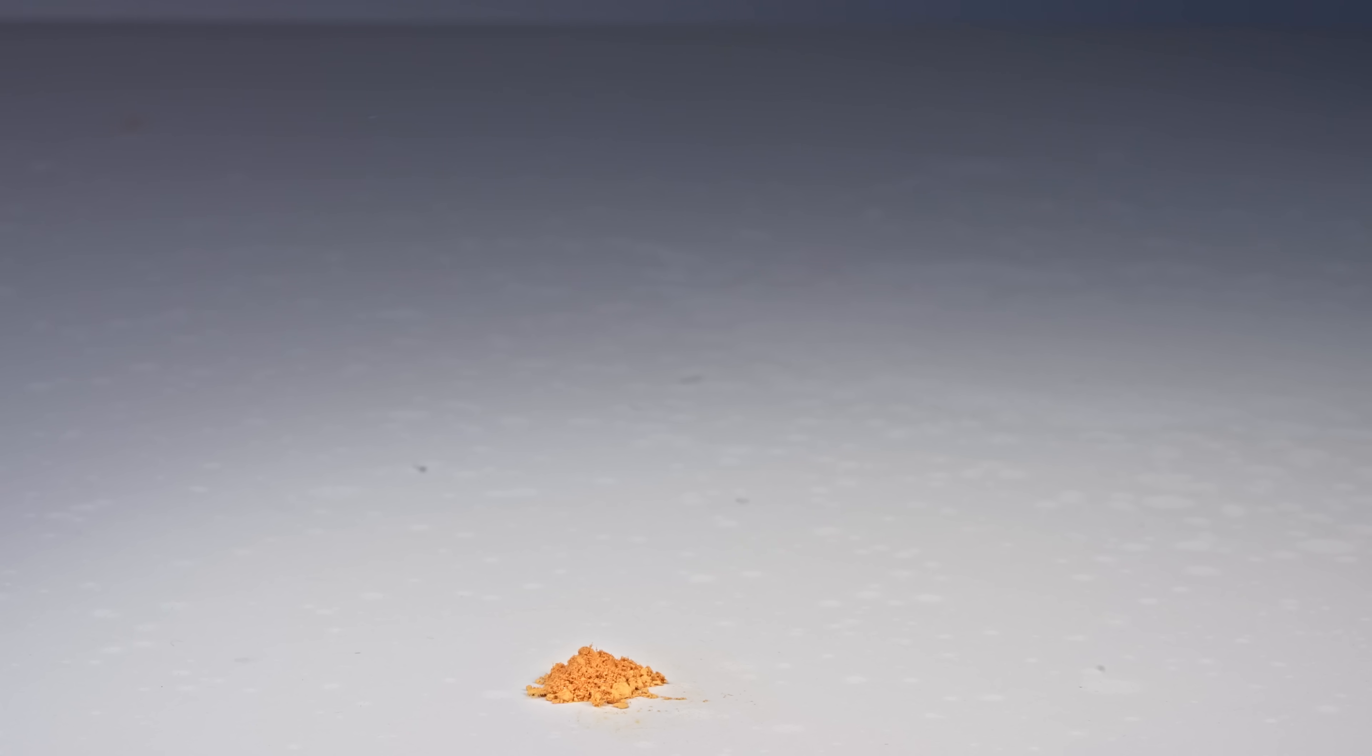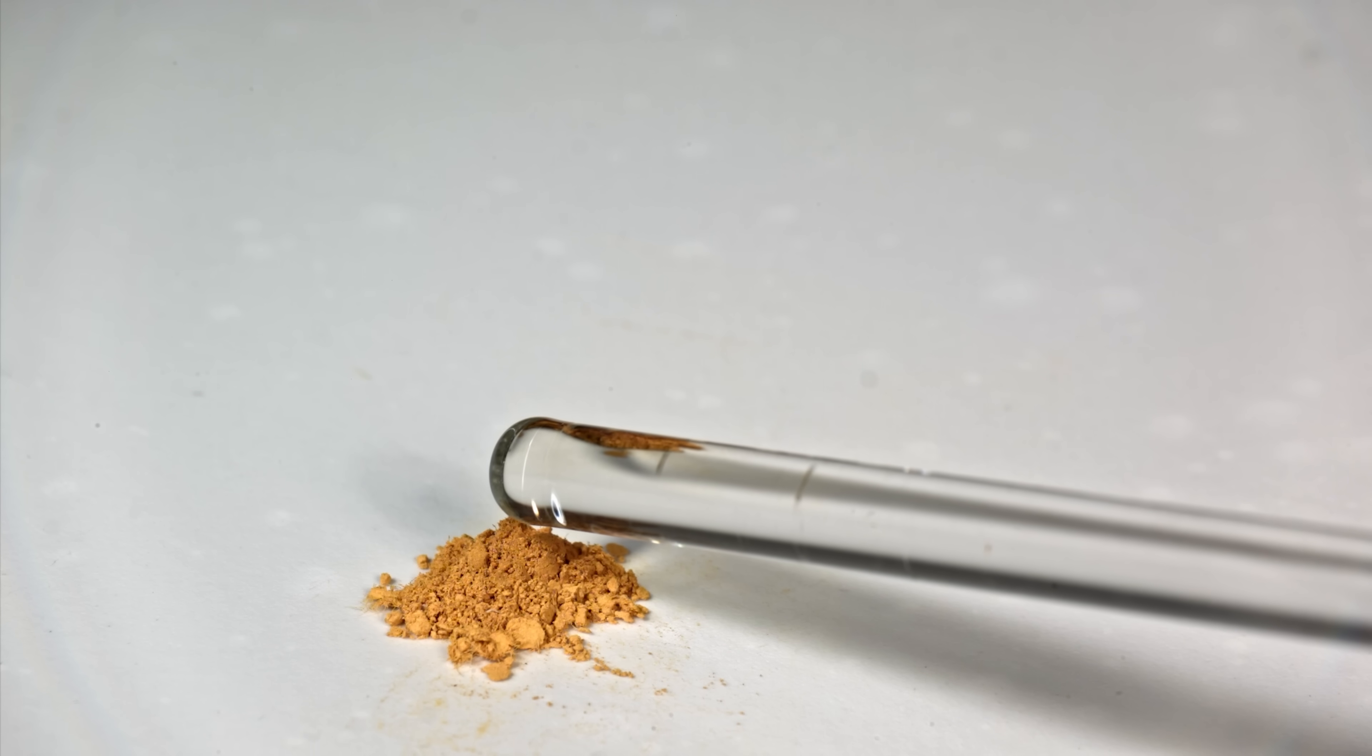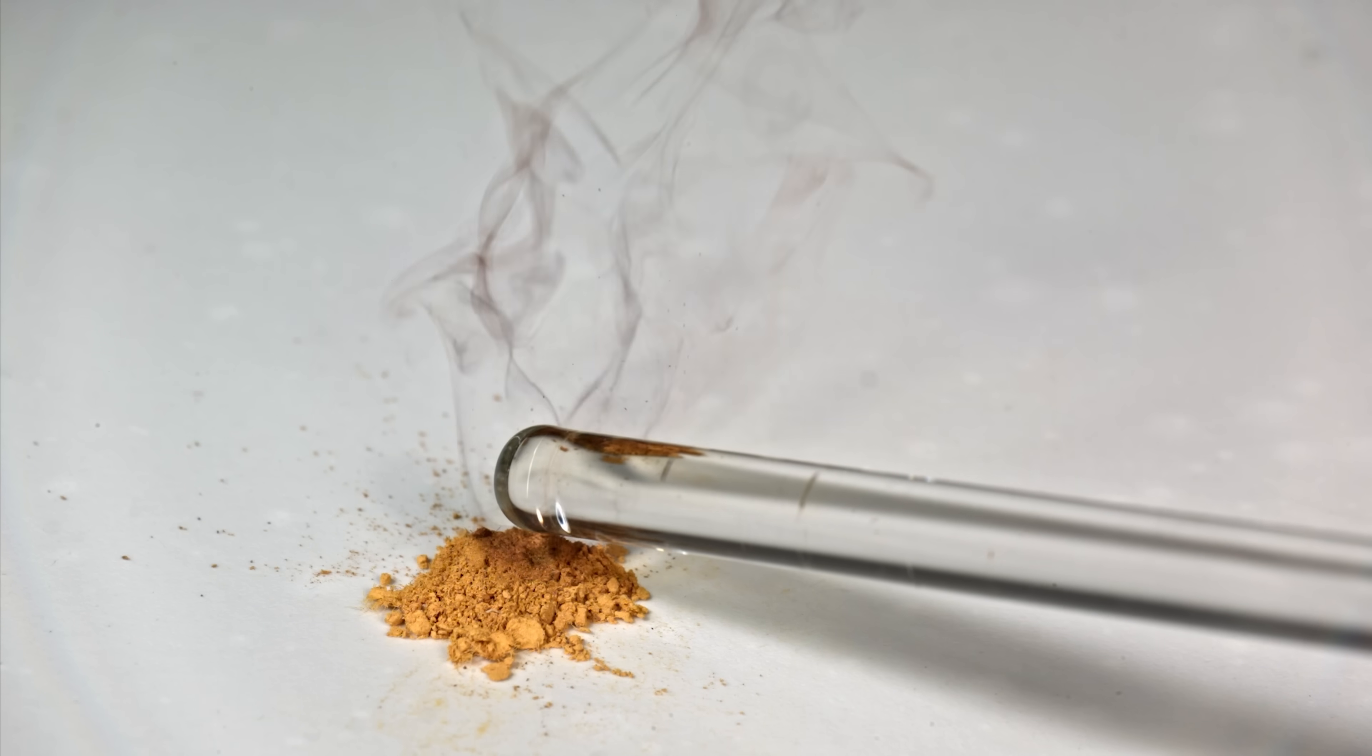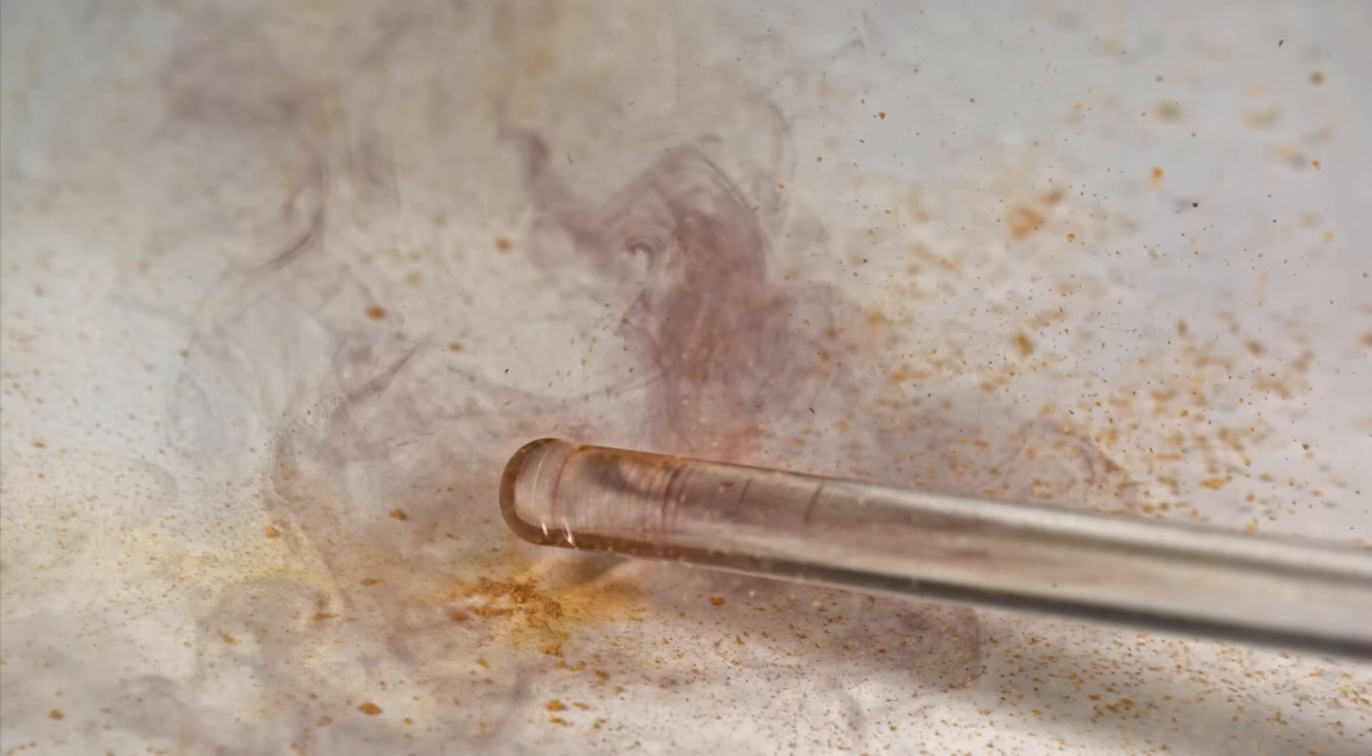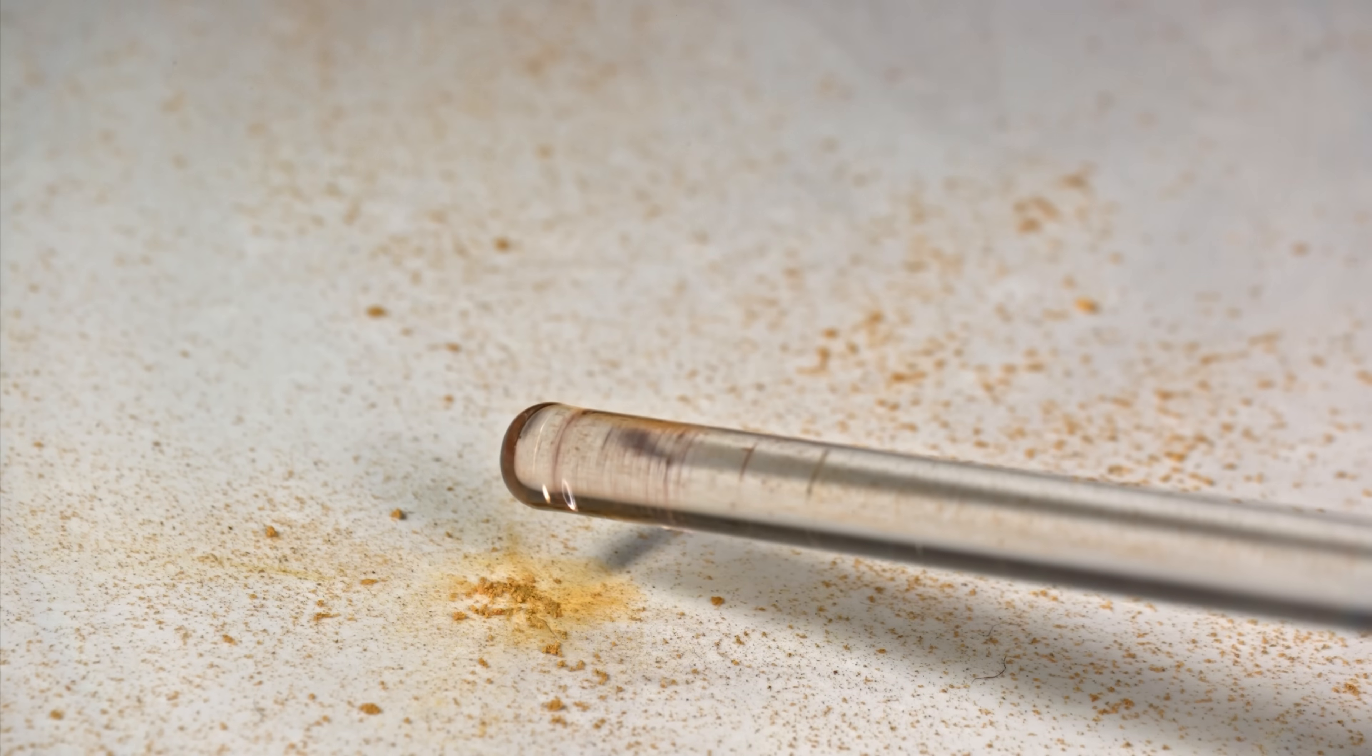Let's try touching it with a hot glass rod. Yeah, this method is much more effective. Let's watch it in slow motion. Now you can clearly see the mysterious purple smoke that puzzled chemists and alchemists for centuries.